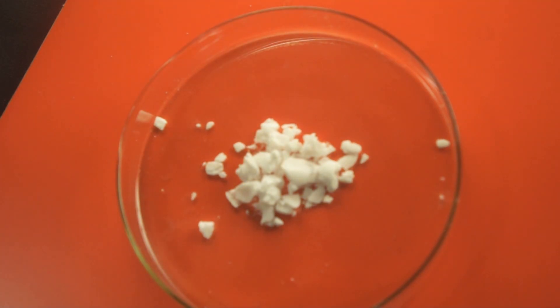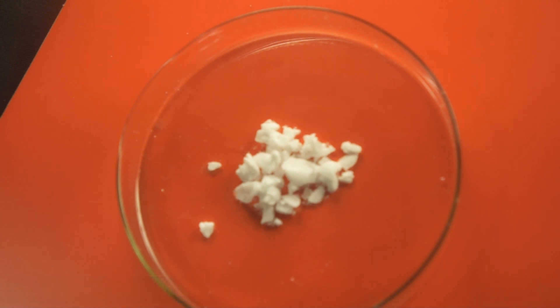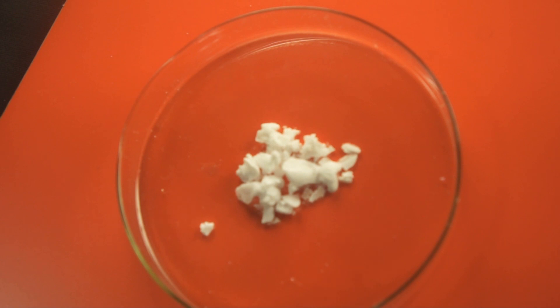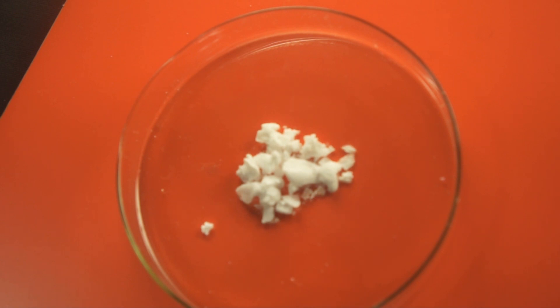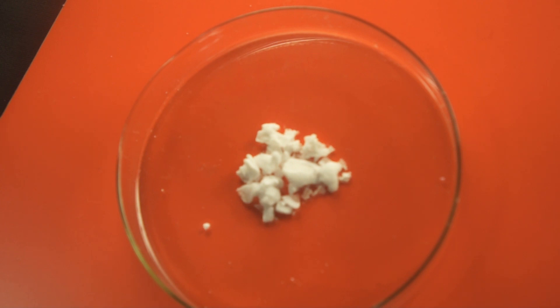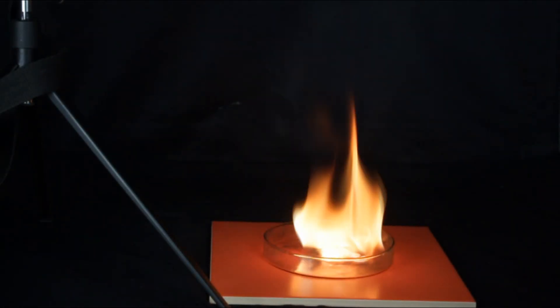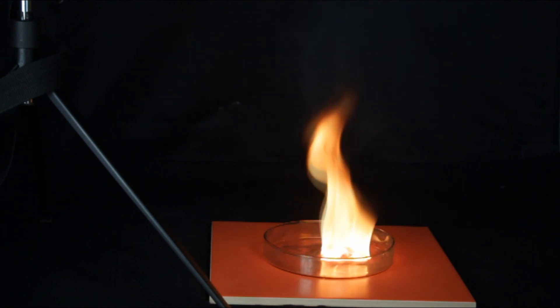So, acetylene — solid acetylene. Under normal conditions, liquid acetylene does not exist. Solid acetylene evaporates like dry ice, bypassing the liquid phase. Solid acetylene burns with a smoky fire because there is not enough atmospheric oxygen for complete burning.